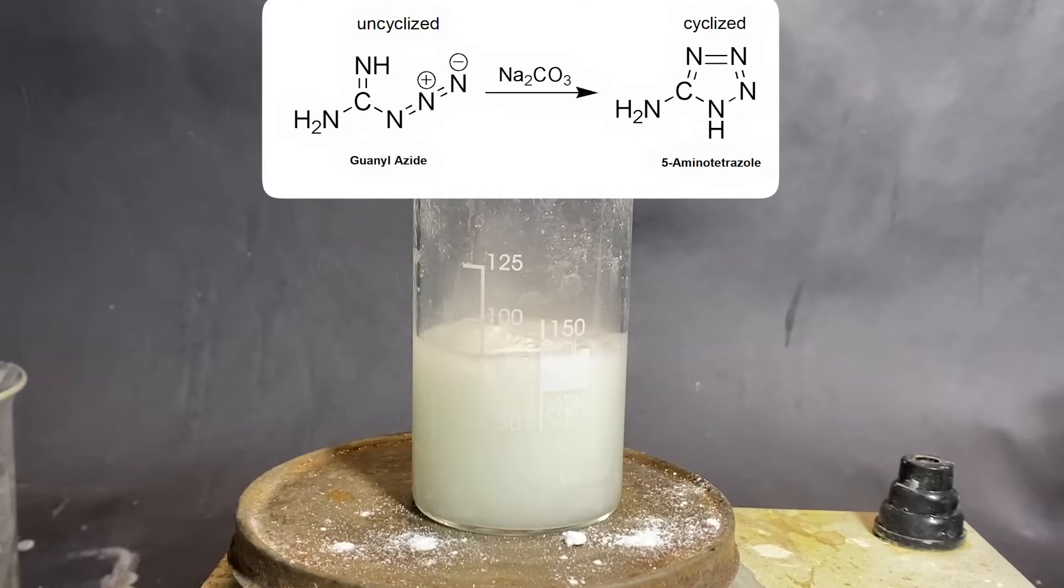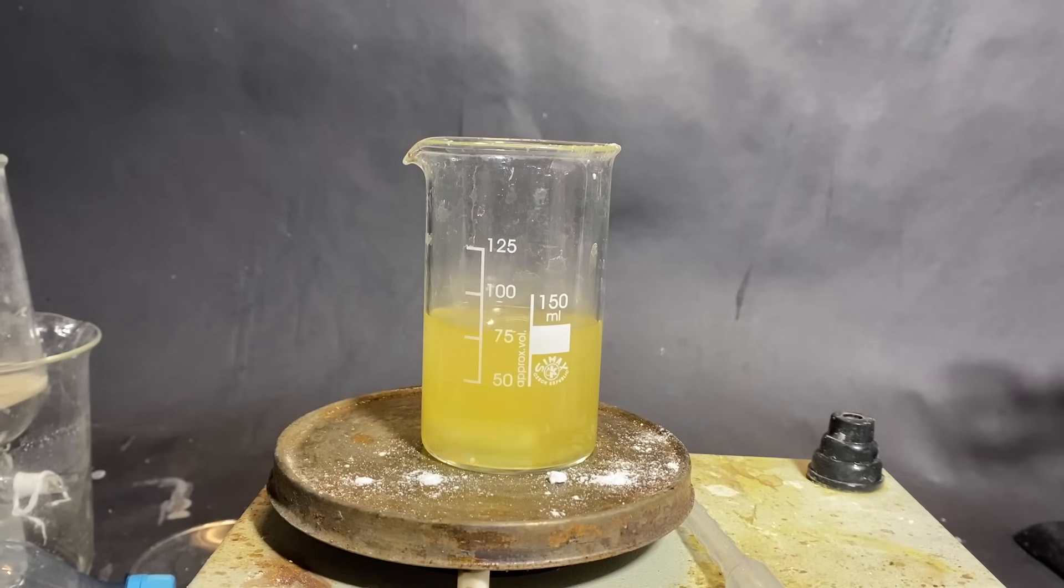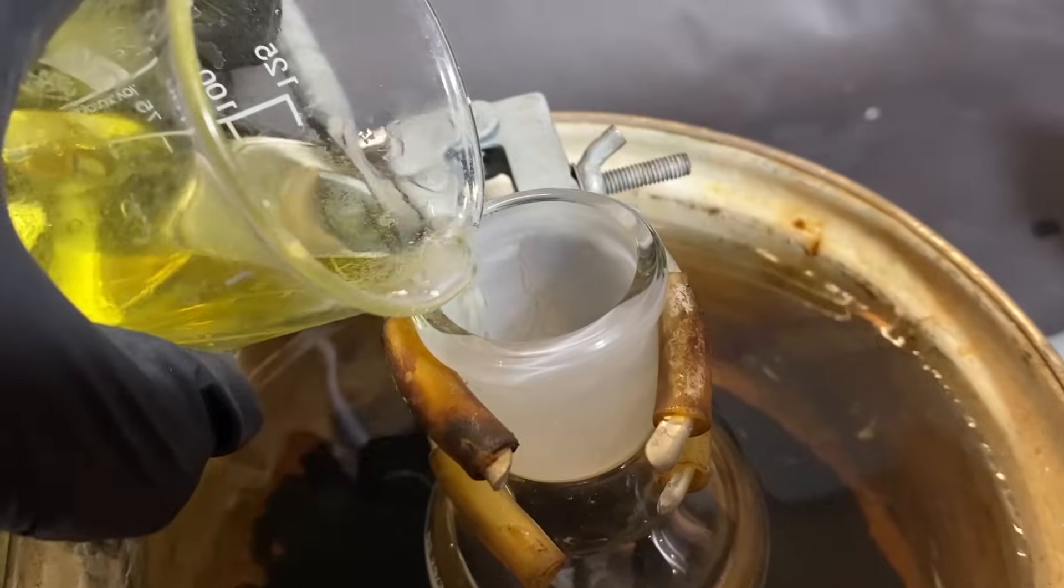If you haven't noticed, we've just transitioned into the last step of the synthesis, aka making 5-aminotetrazole. After the addition, the solution turns this yellowish color, and I honestly have no idea why that is.